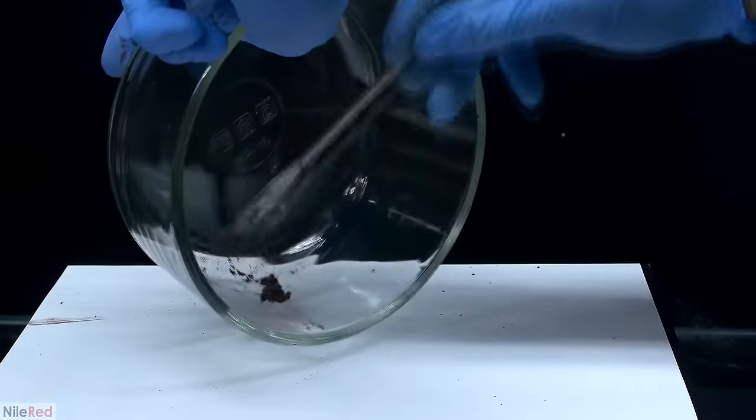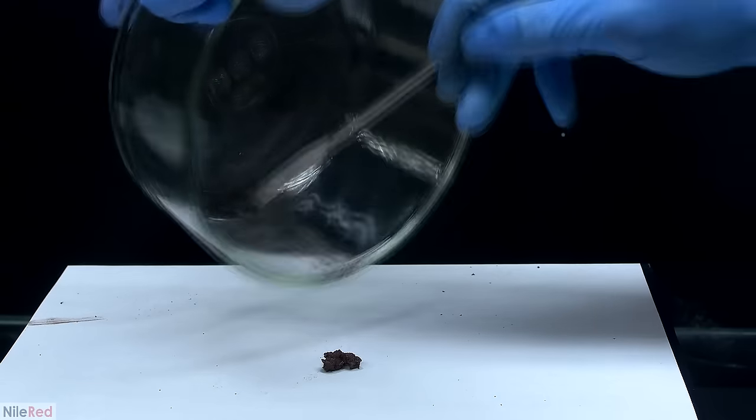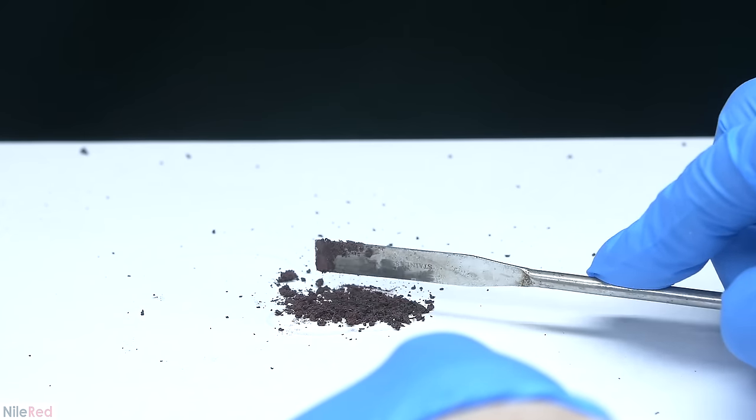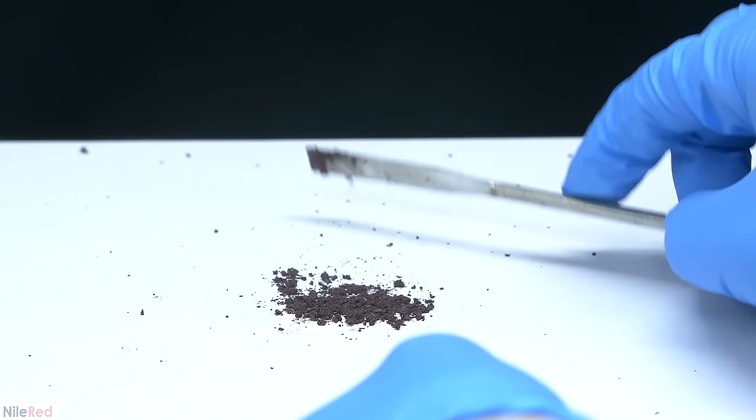At the bottom of the bowl, we're left with red phosphorus that's wet with acetone and to dry things off, I scraped it onto a piece of paper. Initially, the red phosphorus is pretty clumped up, but it should become much more powdery as the acetone evaporates.